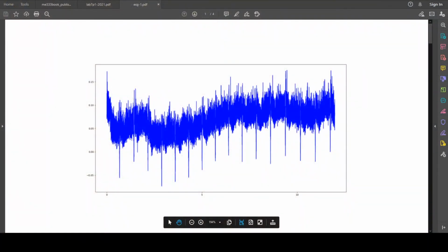So here, I used the CSV method to collect this data. I used single on the nscope, and I waited for 10 seconds to collect this data. This is raw from the instrumentation amp, and I set it to the 100 millivolt setting. We can see there's a little bit of drift going on. We're going to try to fix that with our high pass filter.